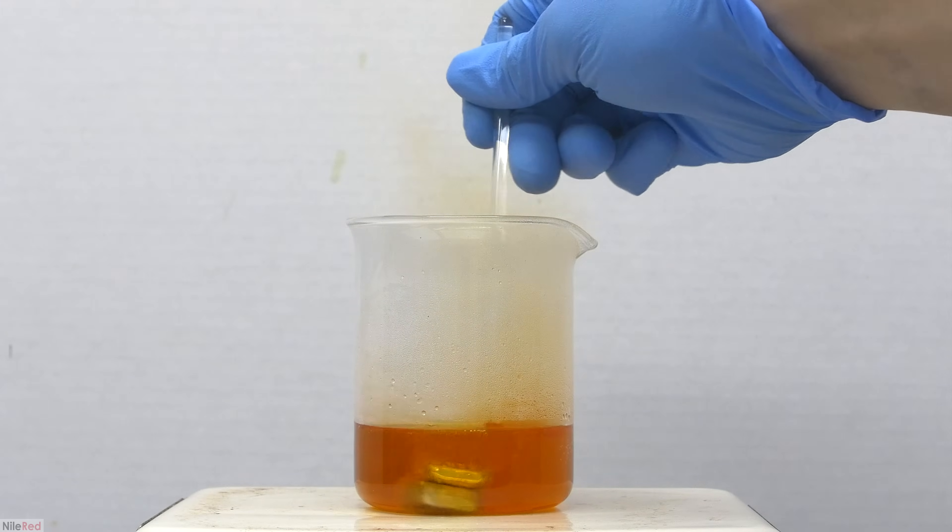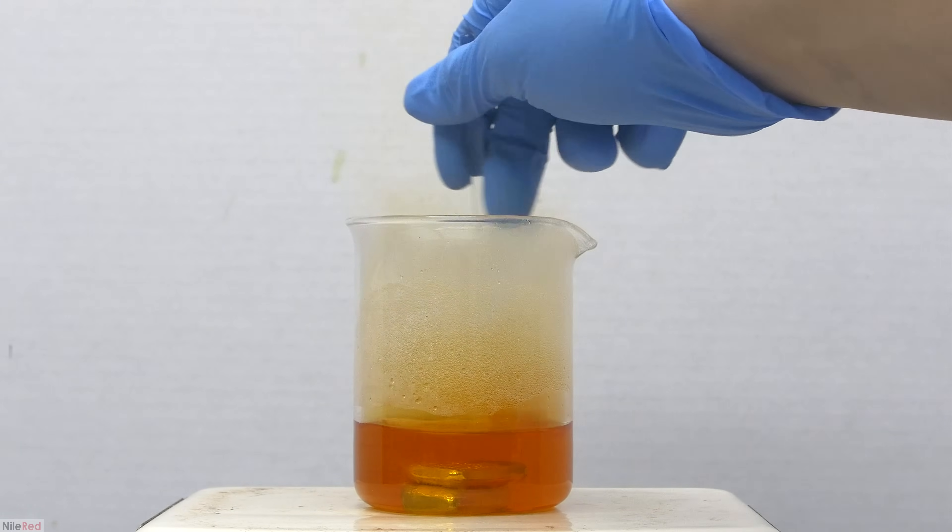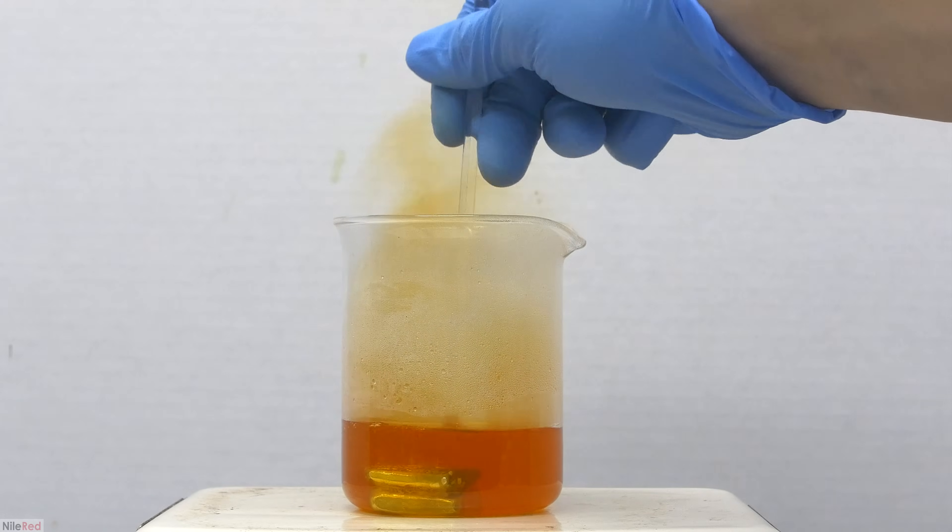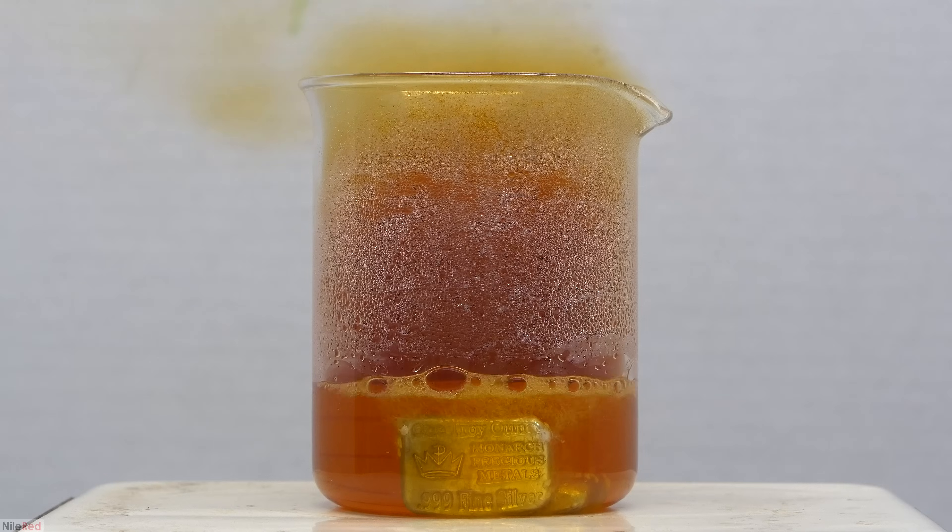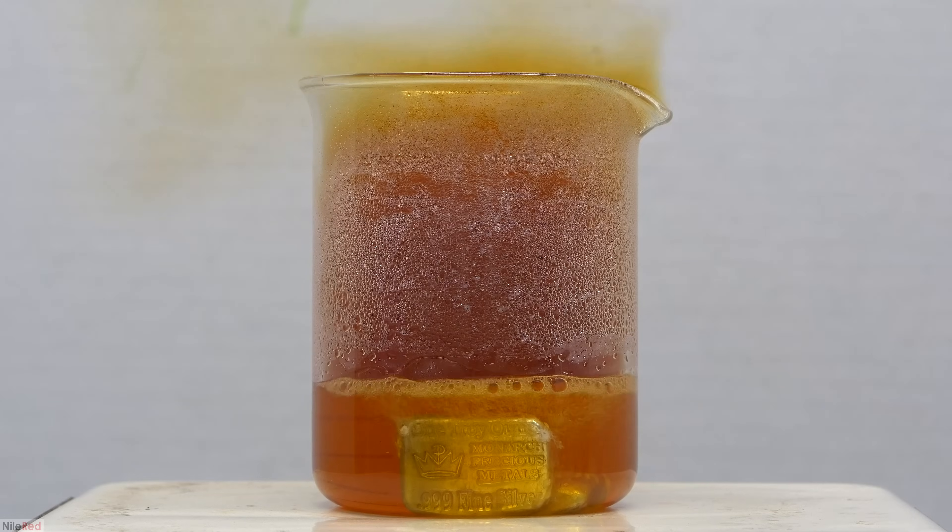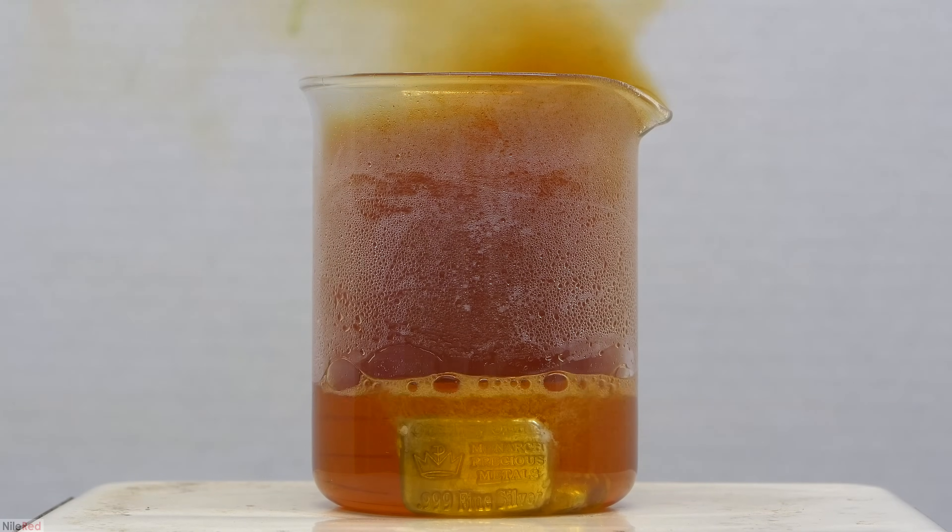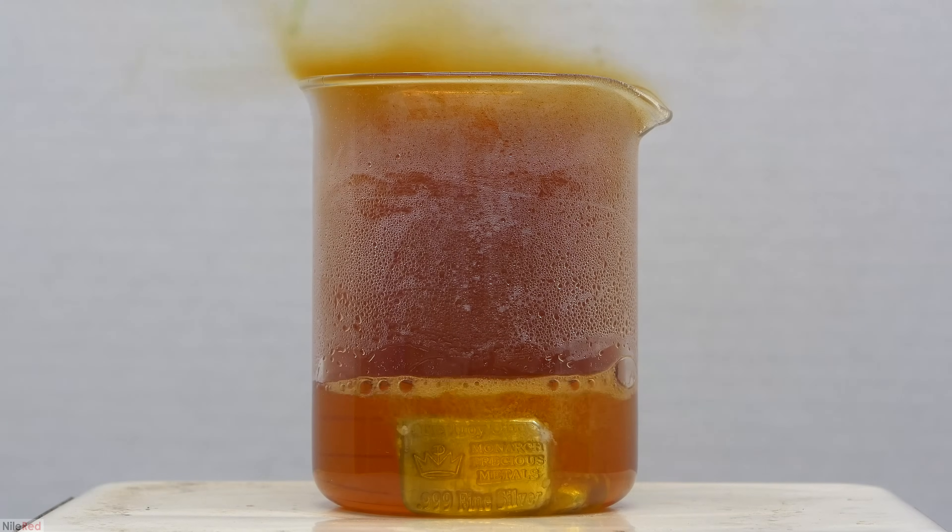As the reaction starts to pick up, we'll have a lot of bubbles coming off the silver metal and we'll start to release some nitrogen dioxide fumes. The fumes will get thicker and thicker and eventually the reaction will take off. Once the reaction really got going, I turned off the hot plate to prevent it from getting out of control.